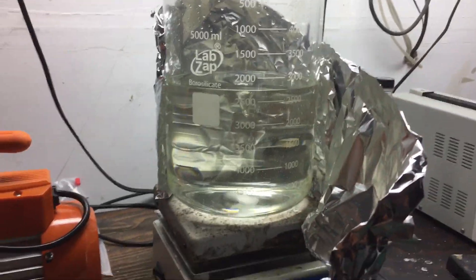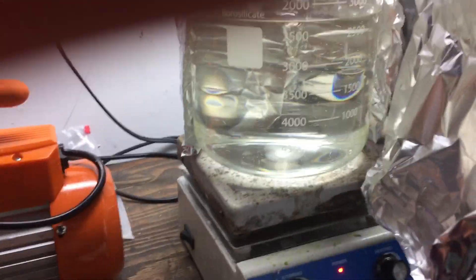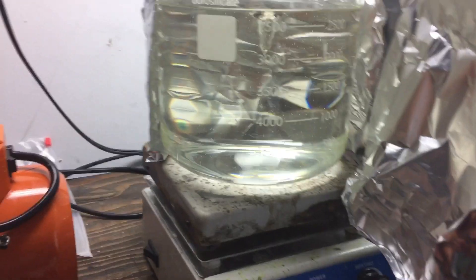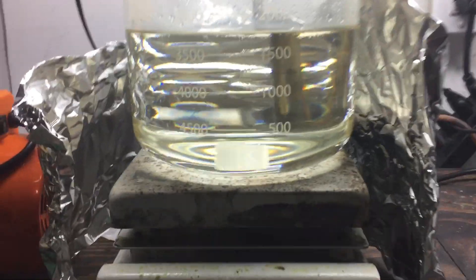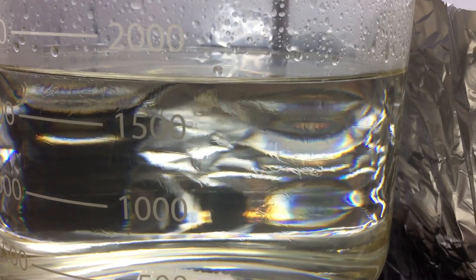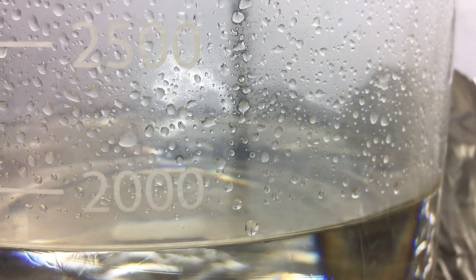This is taking forever. It's an extremely concentrated solution — it's weird to think that there's five pounds of salt inside that liquid and you can barely even tell, other than it being slightly discolored. The body of our solution has been greatly reduced and I've just turned off the heating. By just looking at the glass on the outside you can see this swirling motion right there, and that is showing how saturated the solution is with salt.